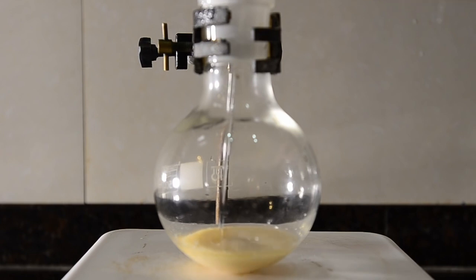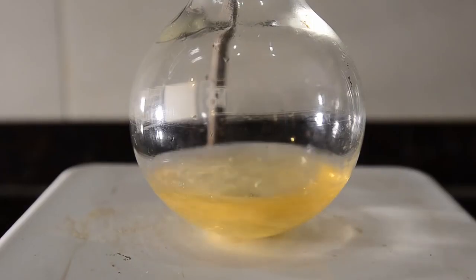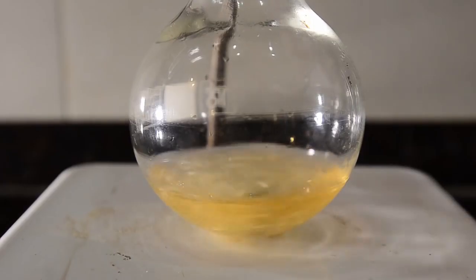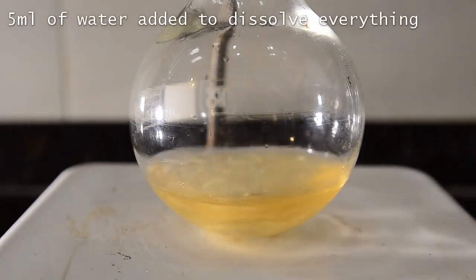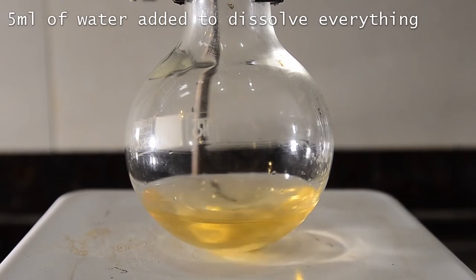You can see that the acid is quite viscous and syrupy. Together the water and the acid very nearly dissolved the mandelic acid, but there were a few lumps floating around so we added another 5 ml of water to get these to dissolve. Perfect!